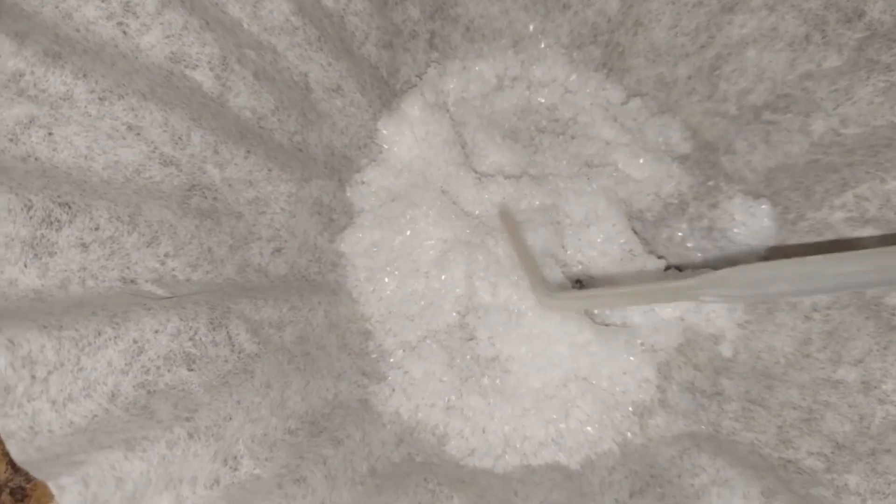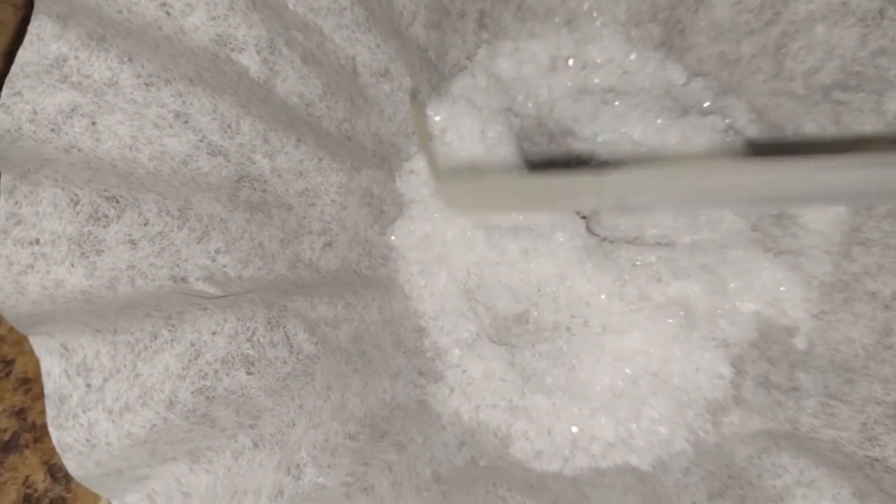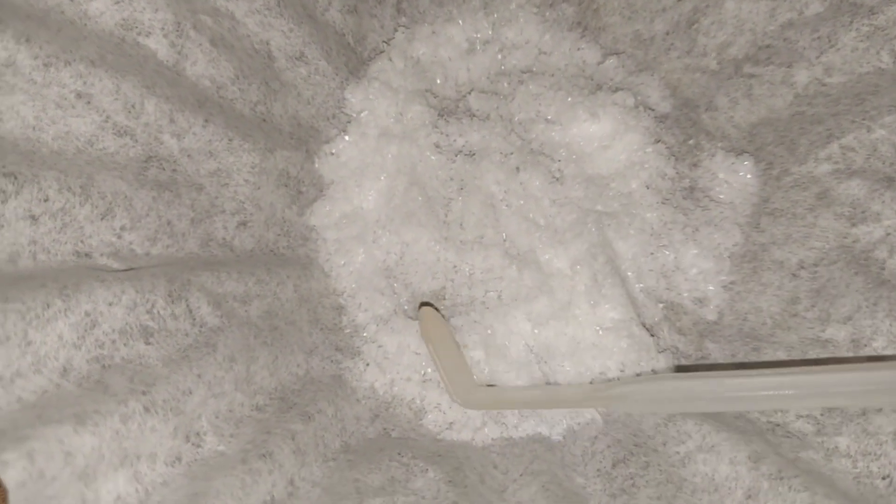And here we have our final dried product, our potassium persulfate. So I plan on using this for a couple of things. One of them is to test some flash powders with it, and the other one is to make some concentrated hydrogen peroxide.